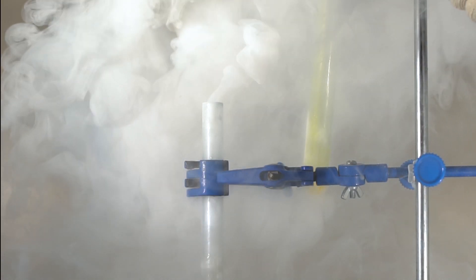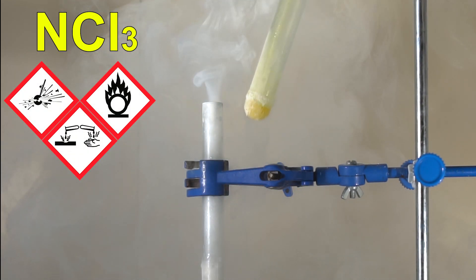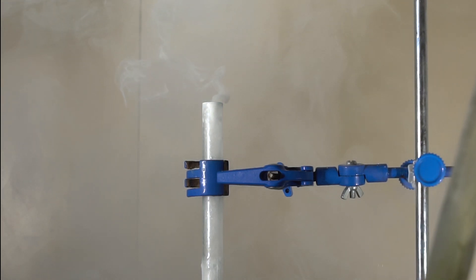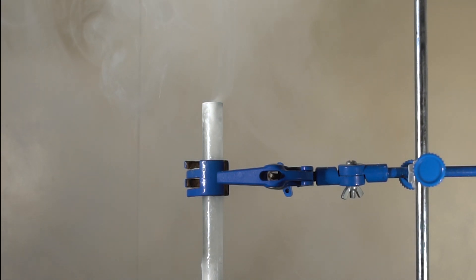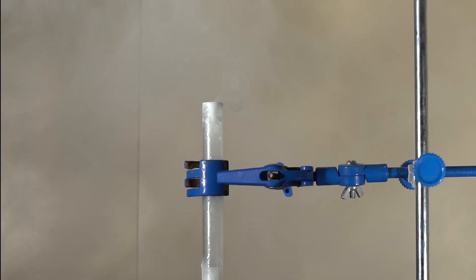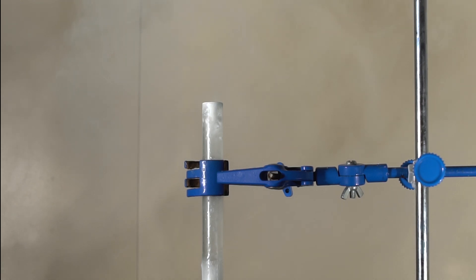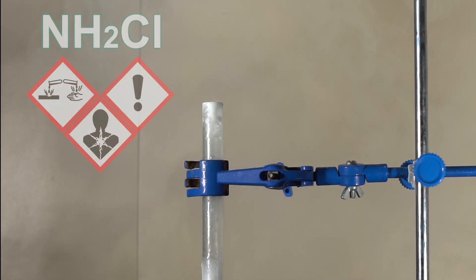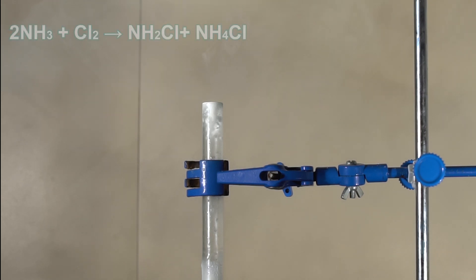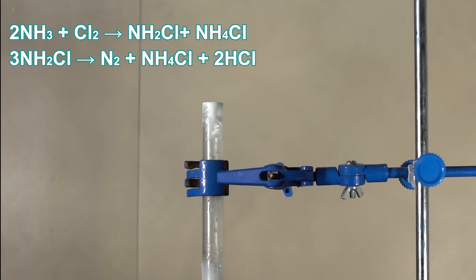Many of you would say that this explosion occurred because of nitrogen trichloride forming. Well, that could've been true if I poured liquid ammonia into liquid chlorine, because we need excess of chlorine to form nitrogen trichloride. That's why I think that the responsibility for the explosion should be on a rapid decomposition of chloramine that forms as a result of the reaction, because chloramine decomposes violently above minus 40 degrees Celsius.